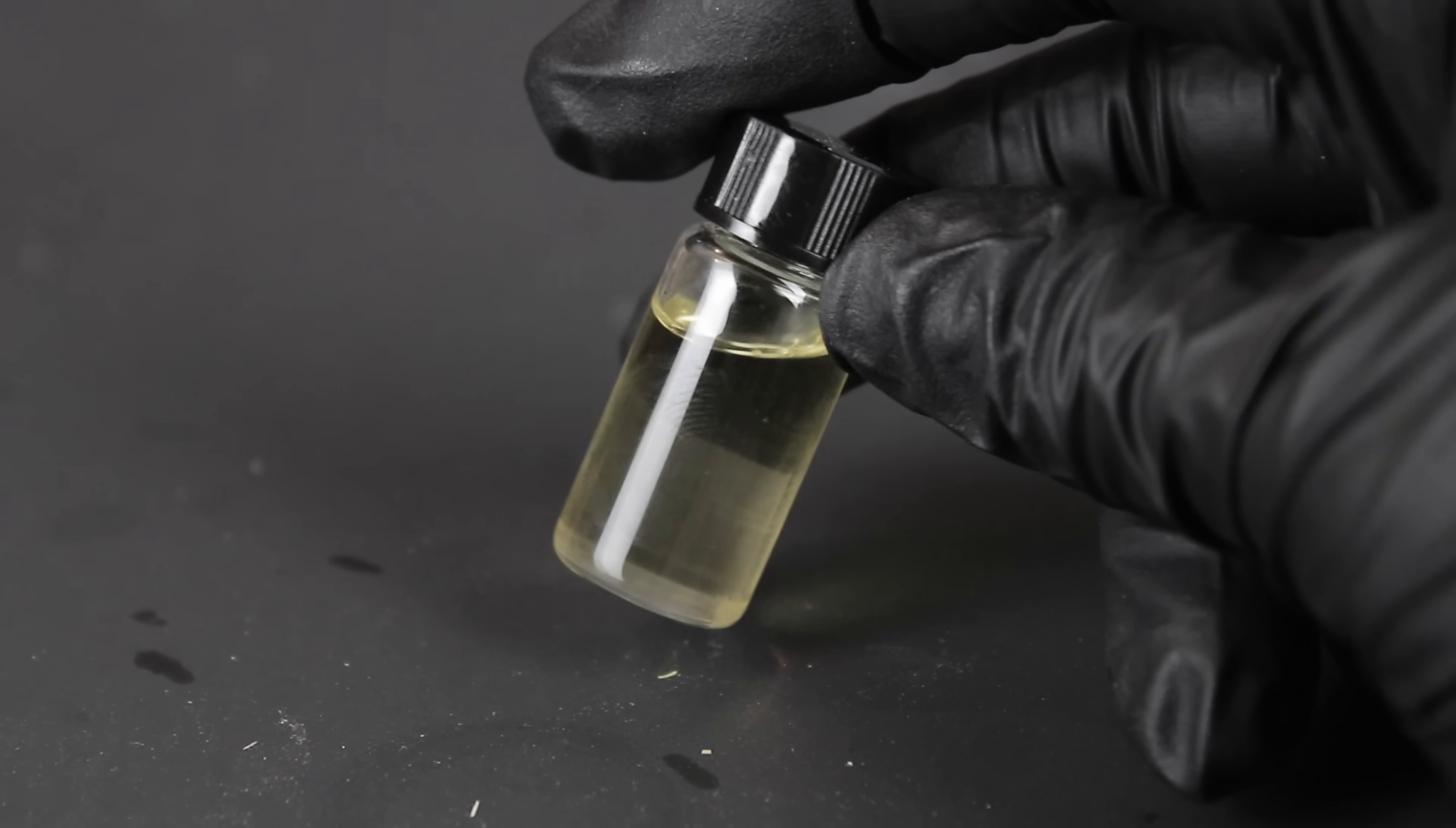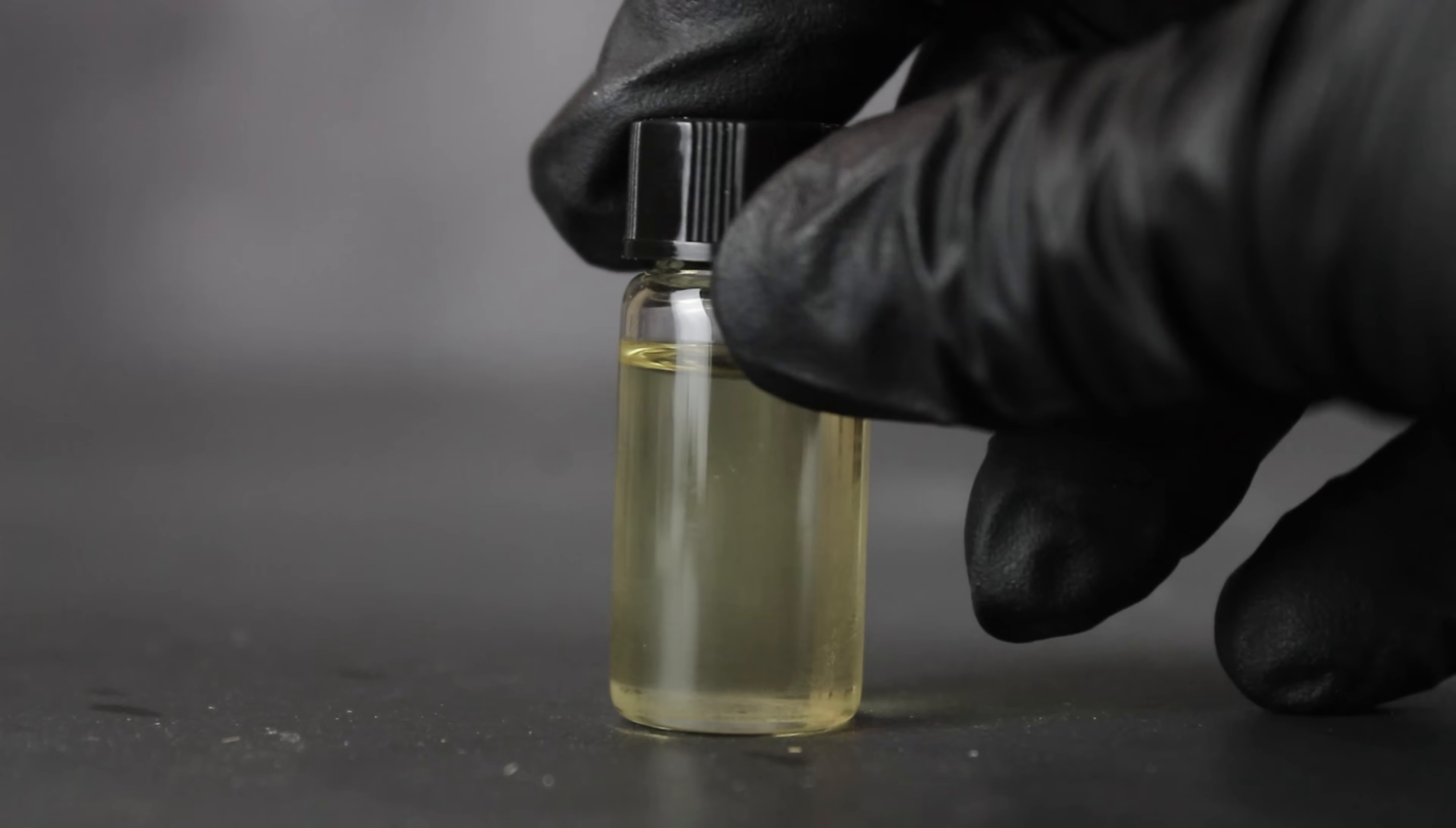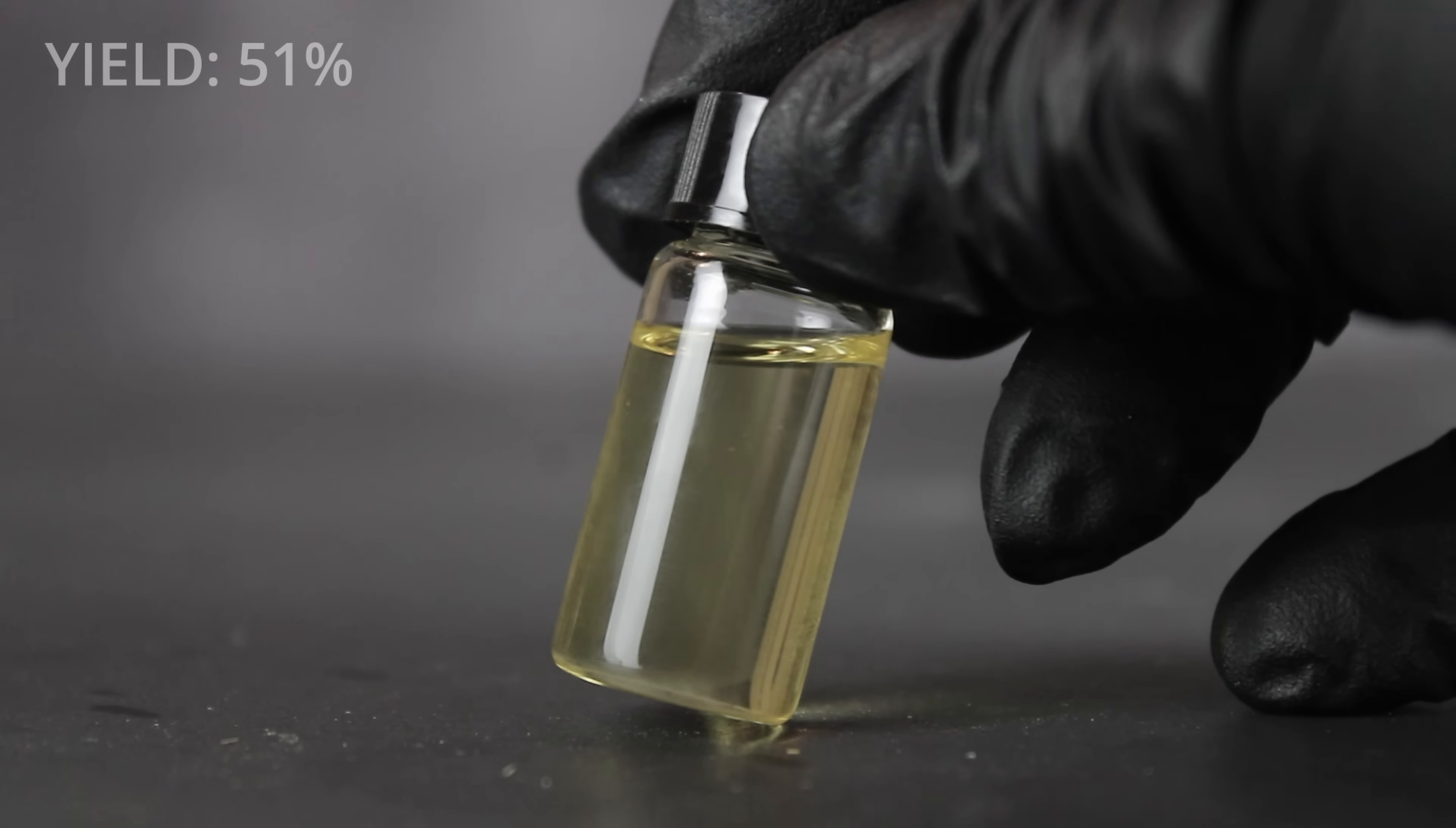In total, I obtained 5.25 grams of clean, slightly yellow nikethamide. Mind you, this was from working up only 6 grams of my original material, which weighed 8.5 grams, so my total theoretical weight would have been something like 7.4 grams. This comes out to a respectable 51% yield, which I'm fairly happy with.